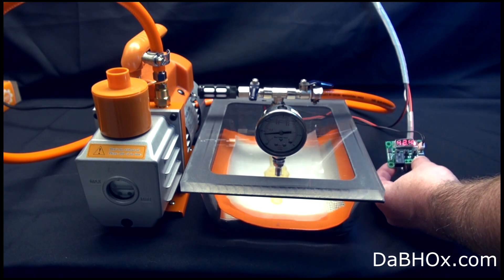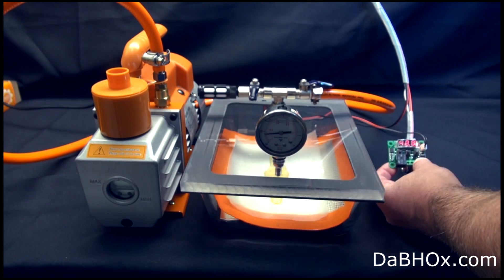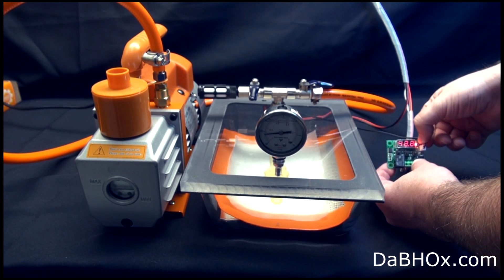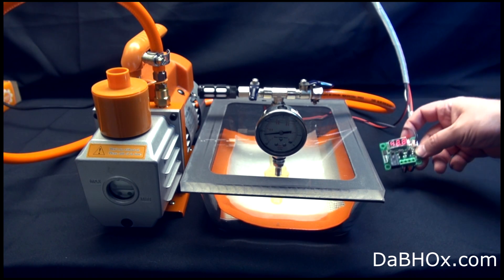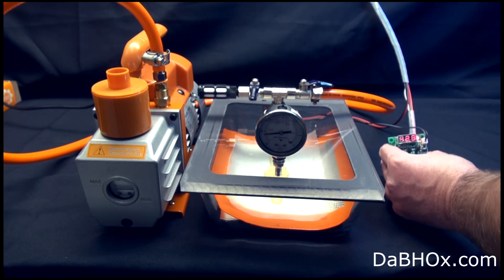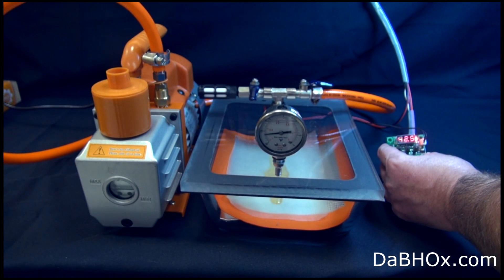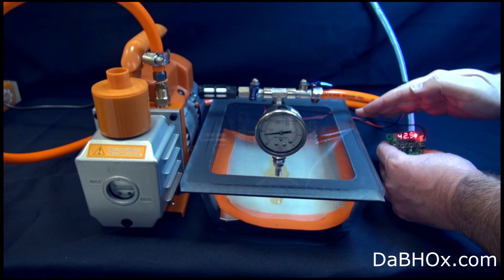The system is going to shut itself off. Basically I'm going to apply the power right now and you can see the LED is on, so this minute the heater is actually turned on and the temperature is going to go up. I'm going to shut the lights off if you want. And you can actually see the temperature is going up rapidly.